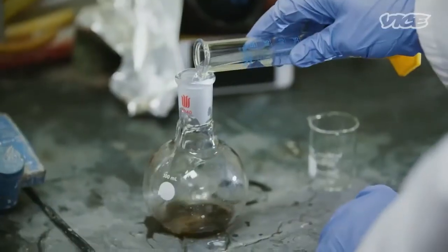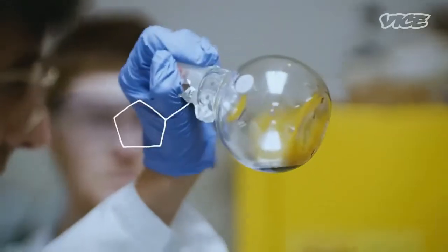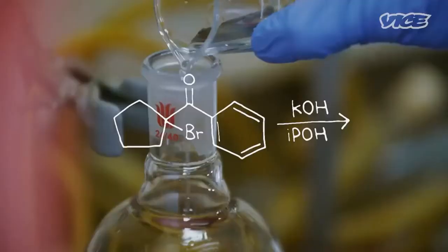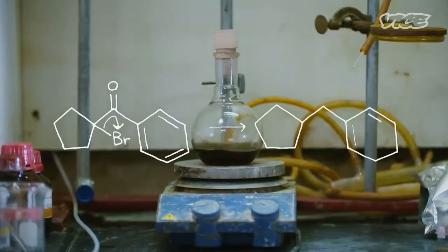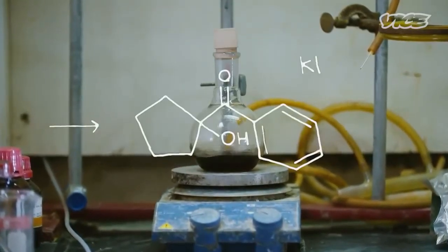The next step is a nucleophilic substitution reaction with hydroxide. The hydroxide is going to be the source of our alcohol. The bromocyclopentyl phenyl ketone is dissolved in isopropanol with a 2 molar excess of aqueous potassium hydroxide. In an SN1 reaction, the bromine acts as a leaving group, and the tertiary carbocation is attacked by nucleophilic hydroxide ions, yielding the hydroxycyclopentyl phenyl ketone. This is the alcohol product.